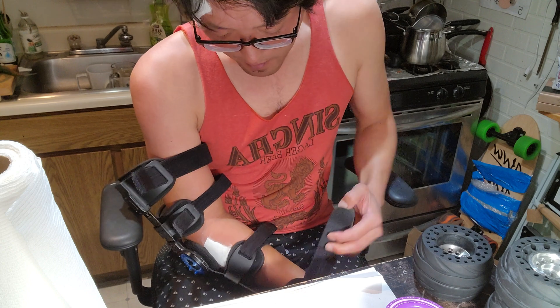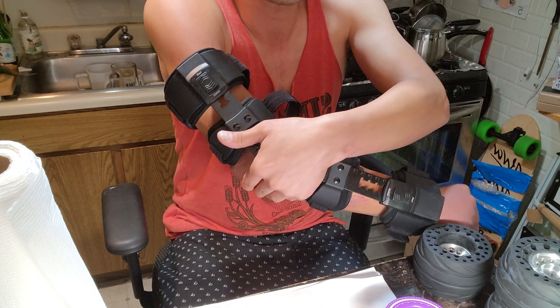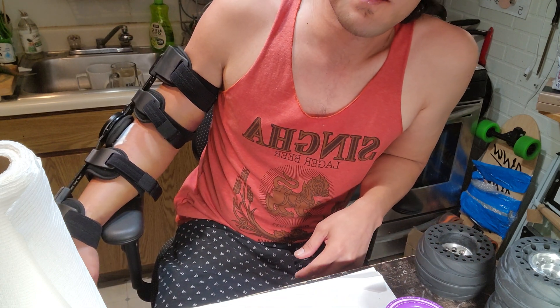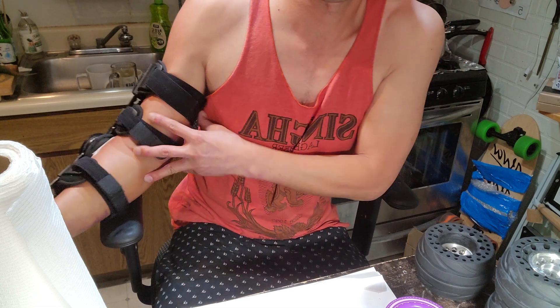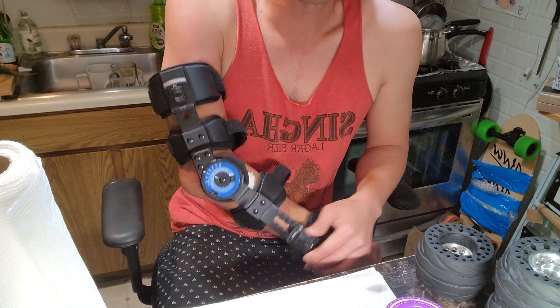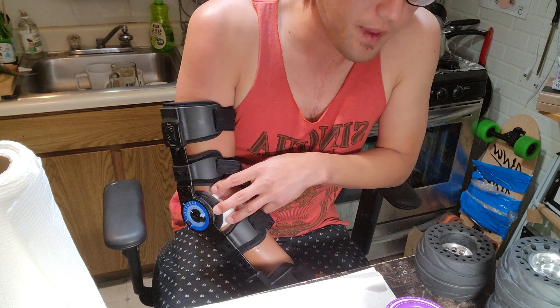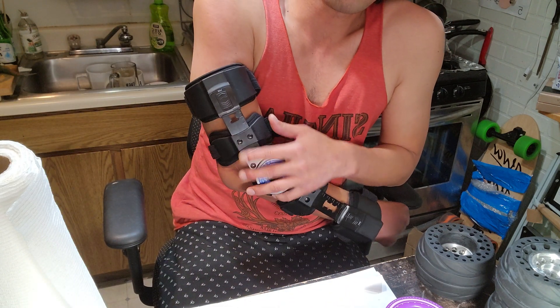This device works because you don't need surgery — you can set your bone at the angle you need. Right now I have the olecranon and I'm trying to push the broken bones toward each other so they'll fuse together. It's sort of an experiment, and I can always get surgery after. I didn't want surgery right now because my arm is still swollen — it's been about nine days. With this I can actually use my arm and lift stuff, and it prevents me from over-extending.